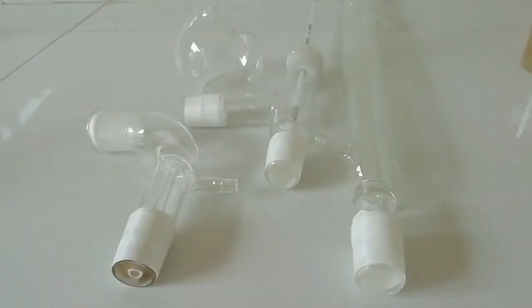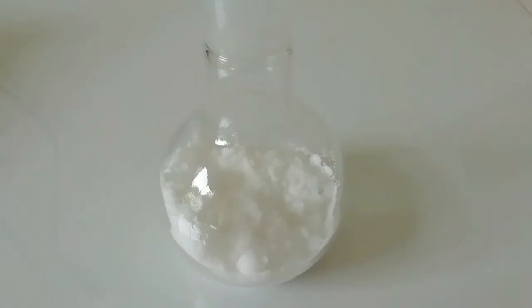Right now you can see these are the glass items I'm going to use - these are 24/29 glass joints covered with PTFE tape that will help to remove the items after the reaction. You can also use concentrated sulfuric acid to seal the joints. Let's move with the procedure.